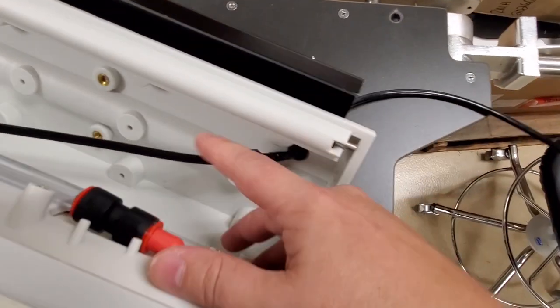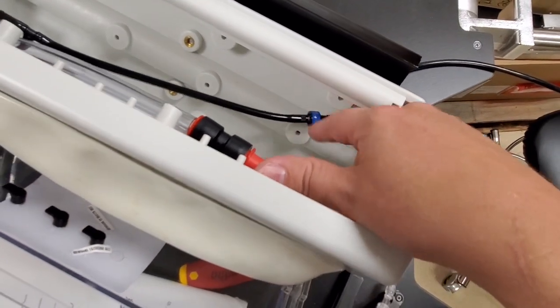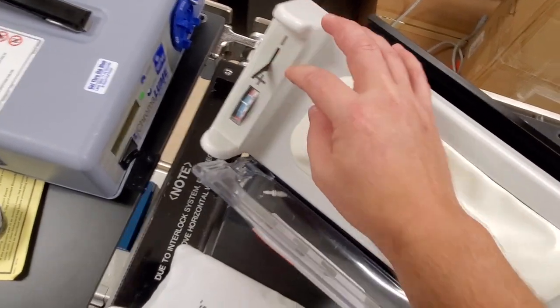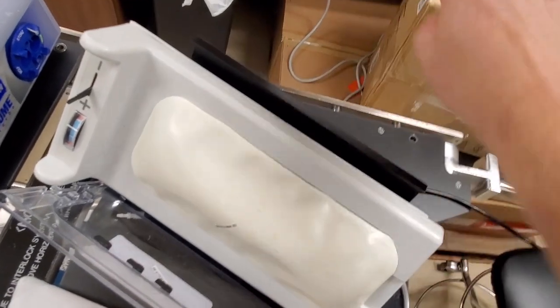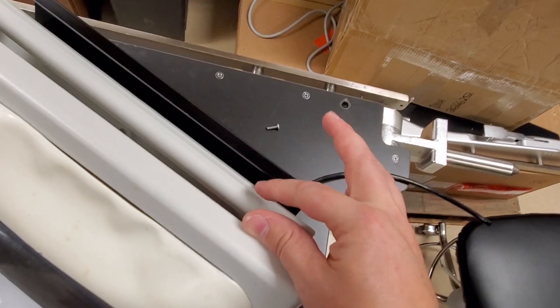At no time does air go backwards this way from one reservoir to the other because of the check valve. So I could actually maintain pressure keeping it on plus while the other cylinder is going. Because in other words, if you popped a hole in one bag, it would leak pressure from this bag. But with that check valve, we don't have that problem.